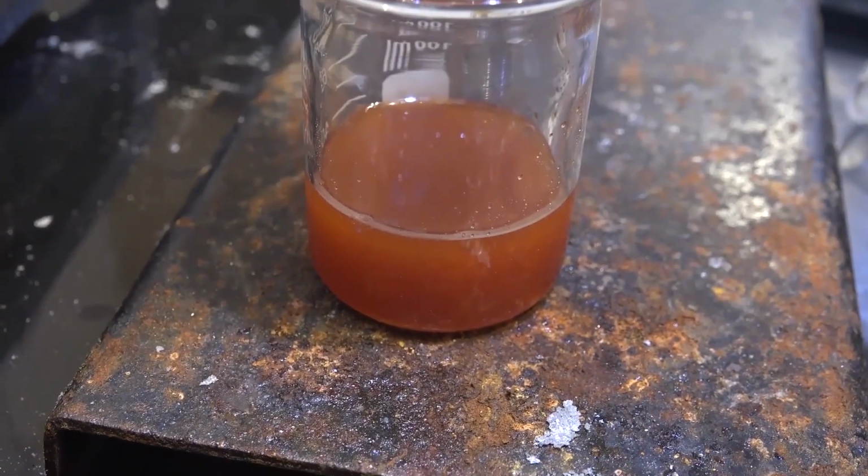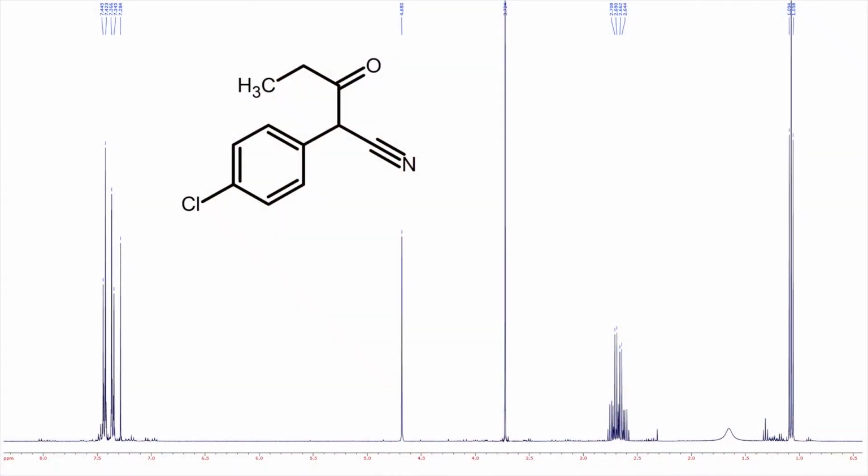I sent a sample off for NMR analysis and got back this spectrum. Over here are the symmetrical aromatic peaks. This peak over here is the chloroform-d solvent peak since I asked the NMR lab to use chloroform-d for the scan. This here is that one little proton on the trisubstituted carbon.